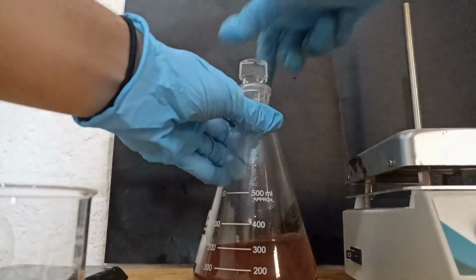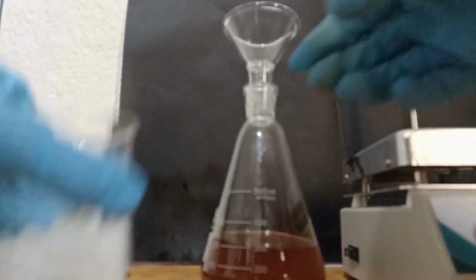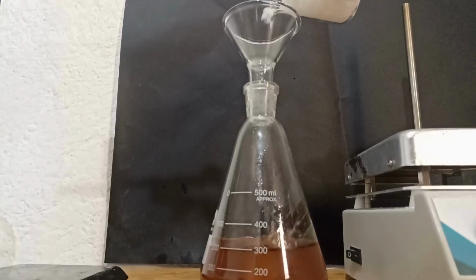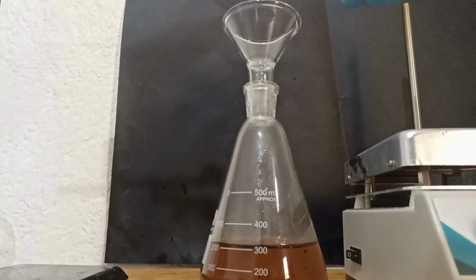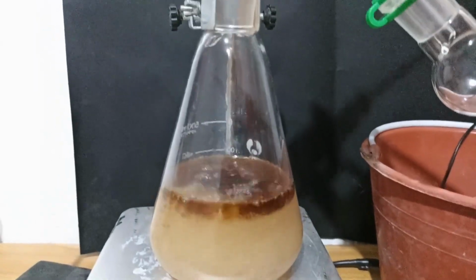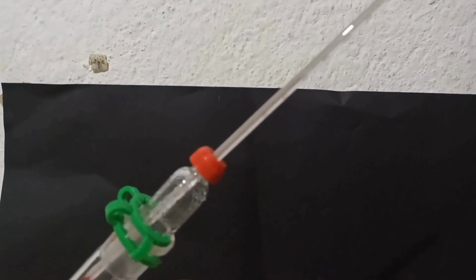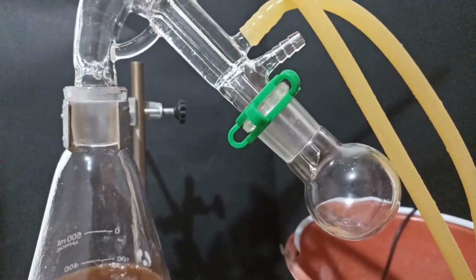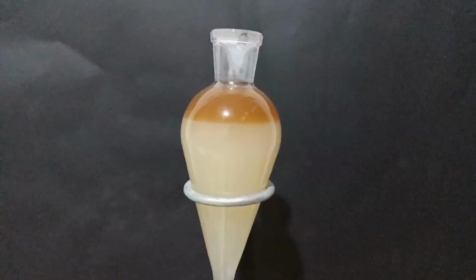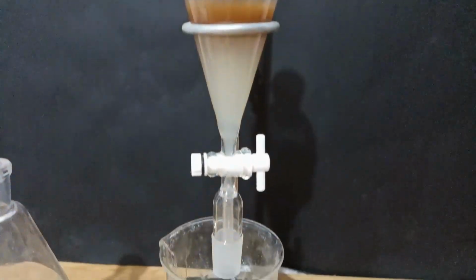When the reflux was finished, sodium hydroxide was added until a pH of 13 was reached. A short path distillation apparatus was placed and the heat was turned up. As I suspected, only a few drops came out at 55 C, the boiling point of diethylamine, because little amide was hydrolyzed. The distillation continued and the distilled water had a very fishy odor, so I kept it. The distillation was stopped and the layers were separated, keeping the upper organic layer.